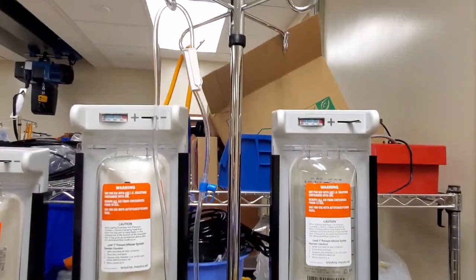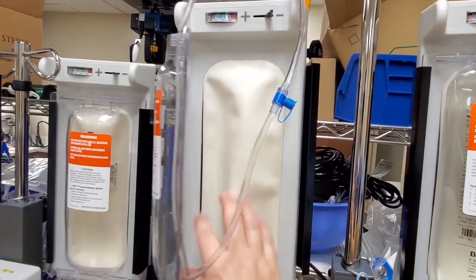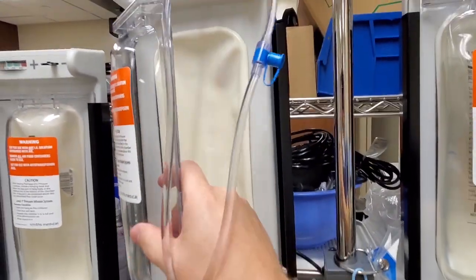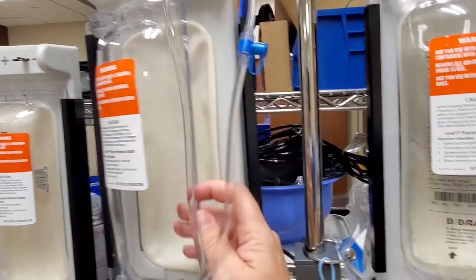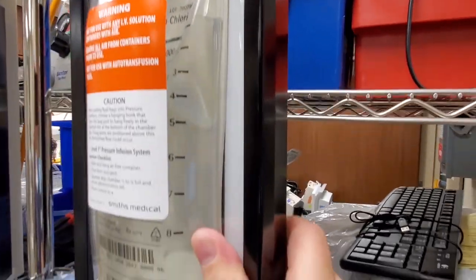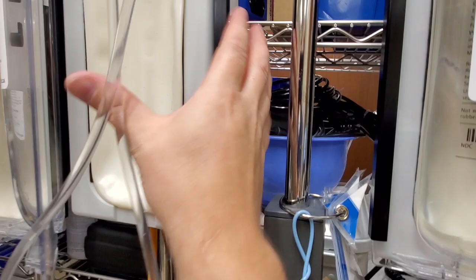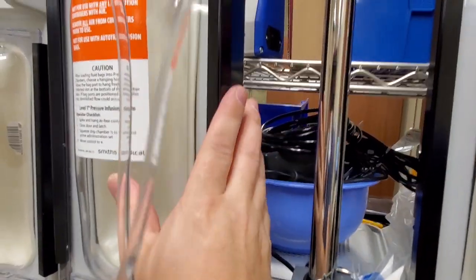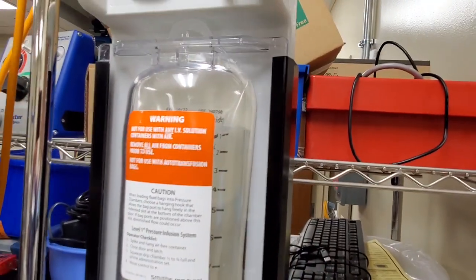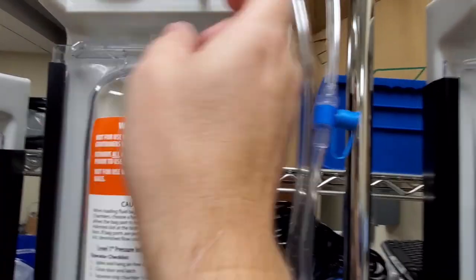So this is a traditional setup. You see we have these two chambers. There's a bag that sits inside it, a bladder. And your saline will get loaded, much like this one. Let's take a look. See, I got a saline bag up in there. And then this clear acrylic lid will close on top of it and this latches. And then we hit the plus at the top, and I'm not going to do it on that one because I'll have fluid all over.